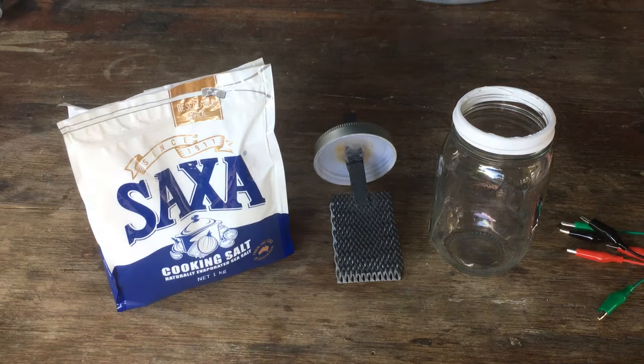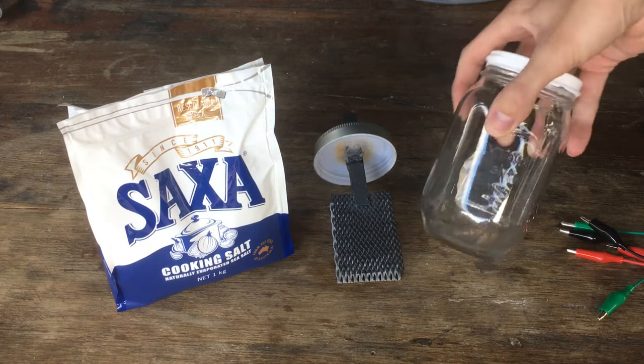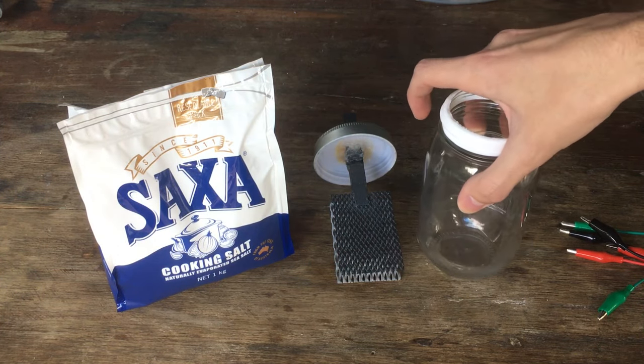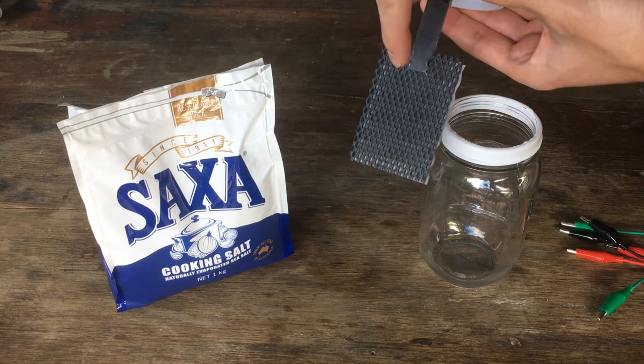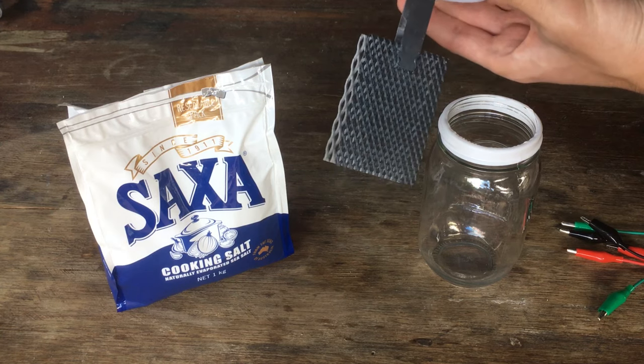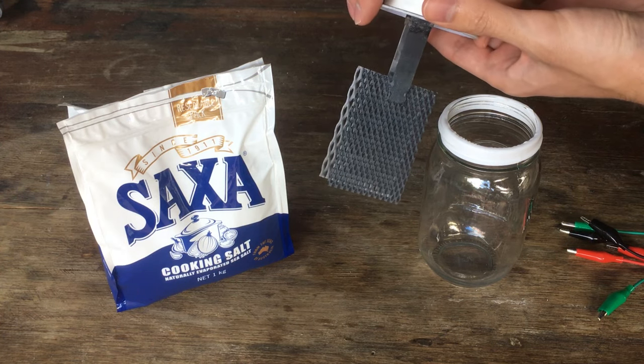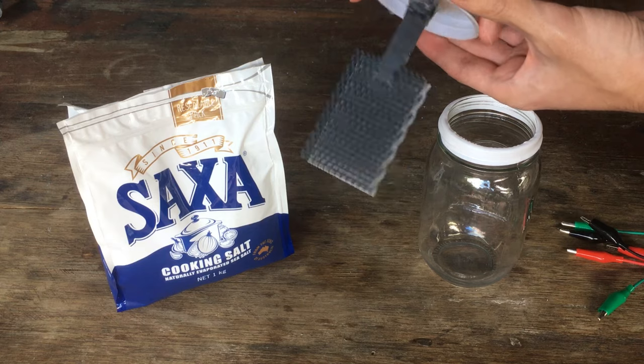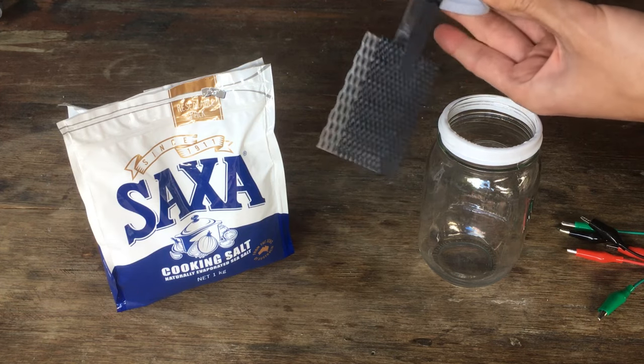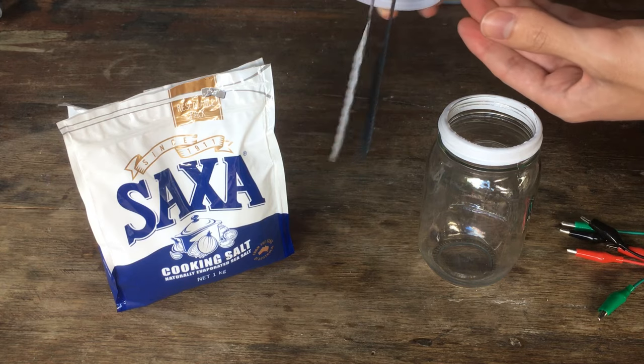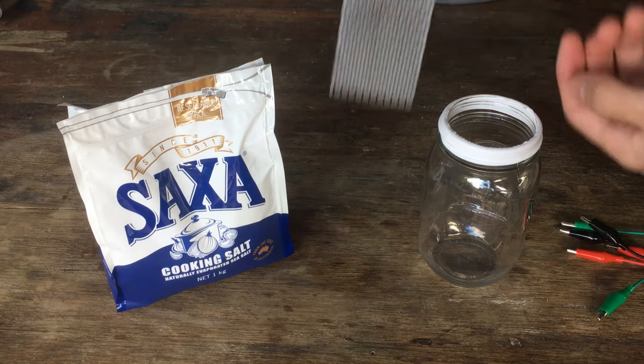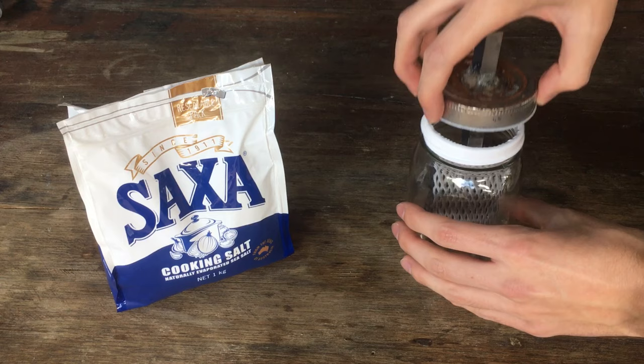To start, as per the last video, we're going to use the exact same cell that we used for the potassium. I have a pair of inert electrodes here. You can see we have an MMO, mixed metal oxide anode, which is a mixture of ruthenium dioxide and iridium dioxide on a titanium substrate. And for the cathode, we just have bare titanium mesh. I've positioned these a centimeter or two apart, and they will dip into our cell jar like that.